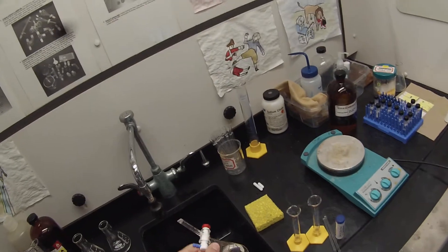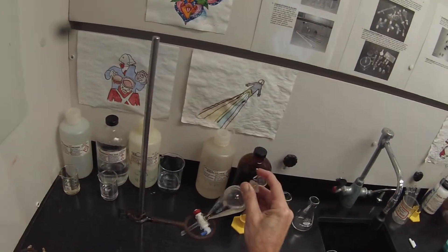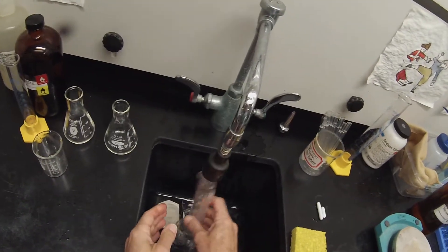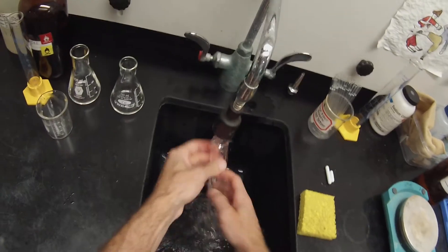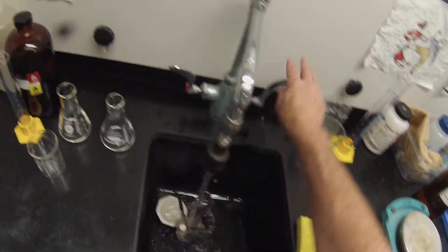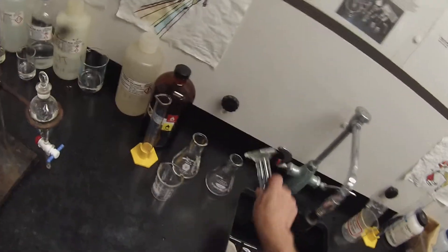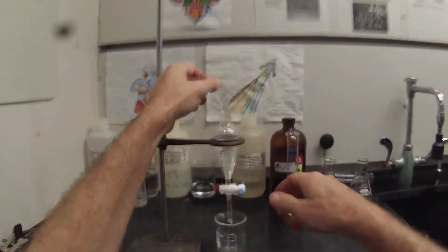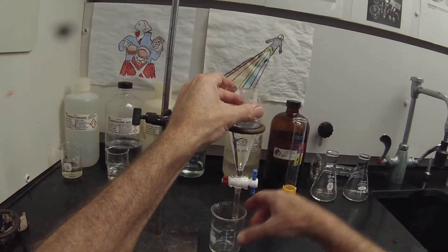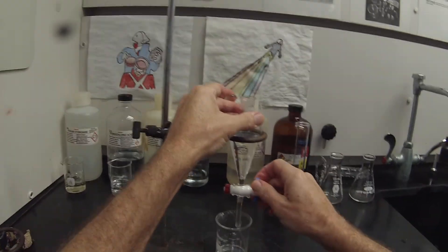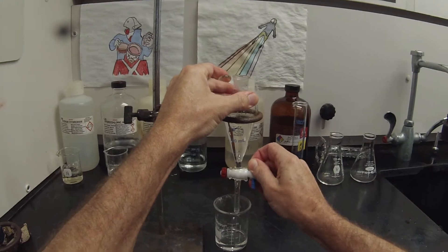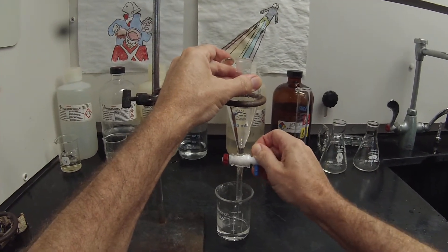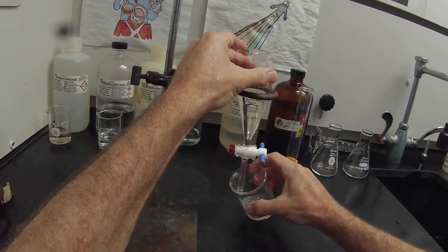At the same time trying to lose as little as possible of our materials into the water layer, because organics are always less soluble in salt water than they are in ordinary water. We'll rinse the sodium chloride out. I'm going to use the original beaker to draw the aqueous layer into. You can see that there's a little bit of white solid crystallizing on the tip. We're going to be losing a little bit of material there, but hopefully not enough to matter. I'm pretty confident I don't need this water layer, I'm just going to dump it.